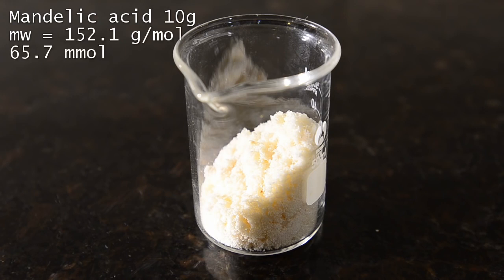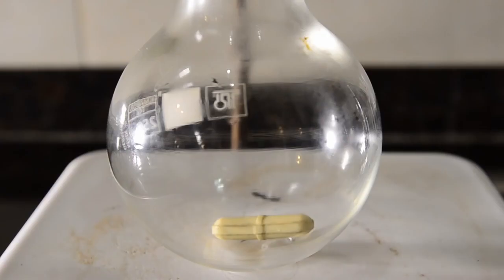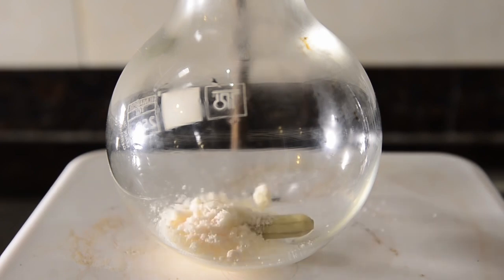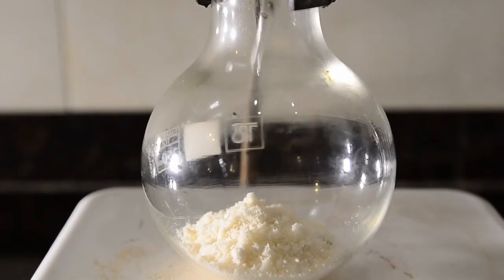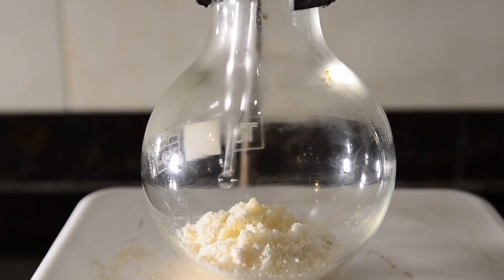We weighed out 10 grams of mandelic acid crystals as you can see here. For details about how to synthesize mandelic acid, check out our other video linked here. We set up a 250 ml flask equipped with magnetic stirrer, and added the dry mandelic acid to the flask. Then we got a small amount of cold water, about 10 ml, and slowly added this dropwise with stirrer to dissolve the acid. We added just enough to make a stirrable slurry.